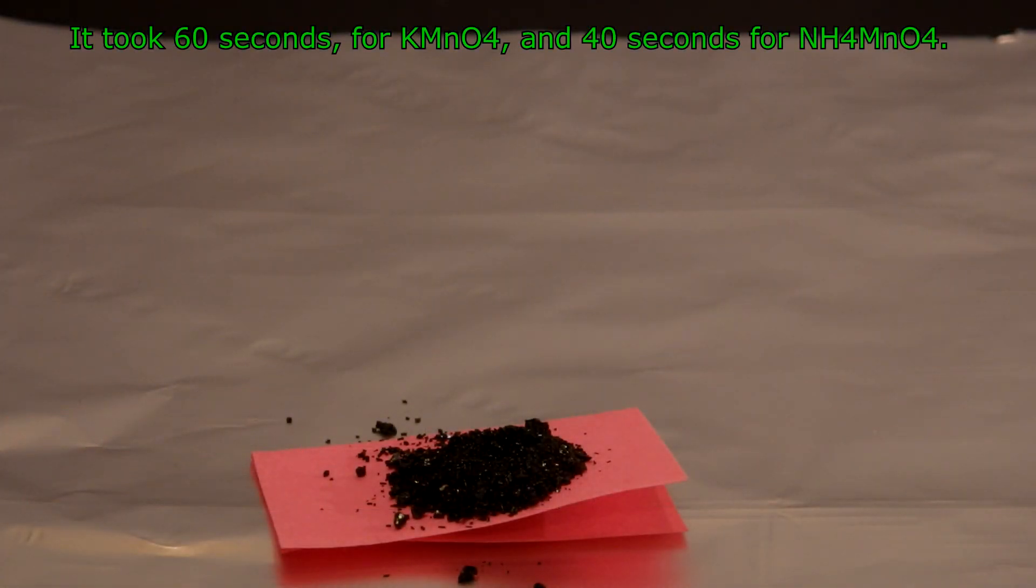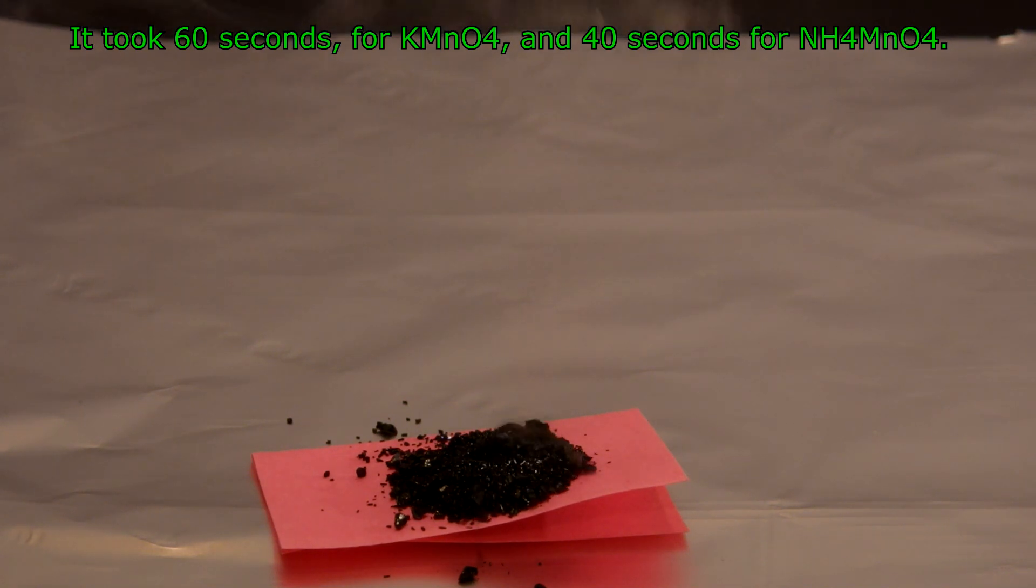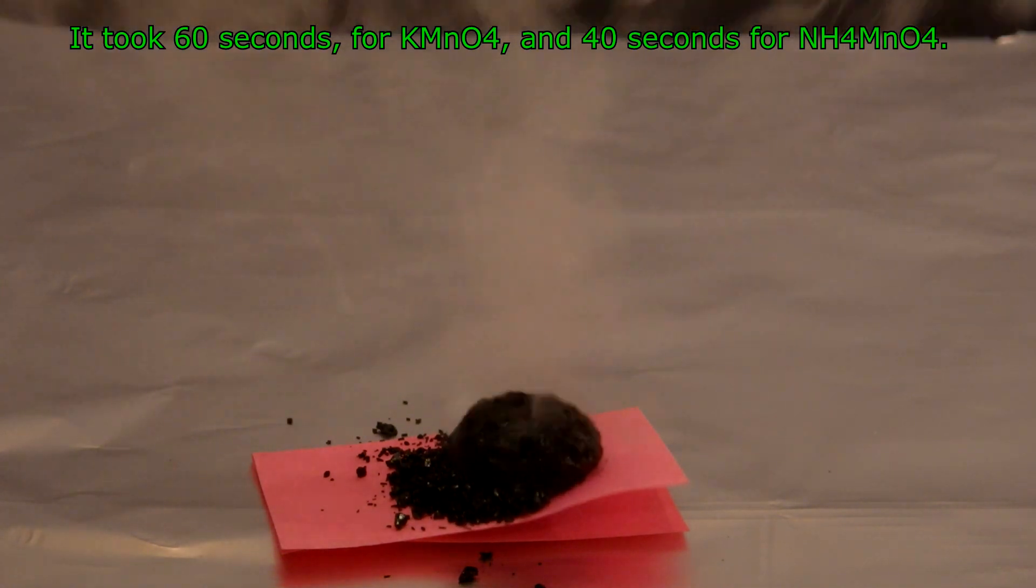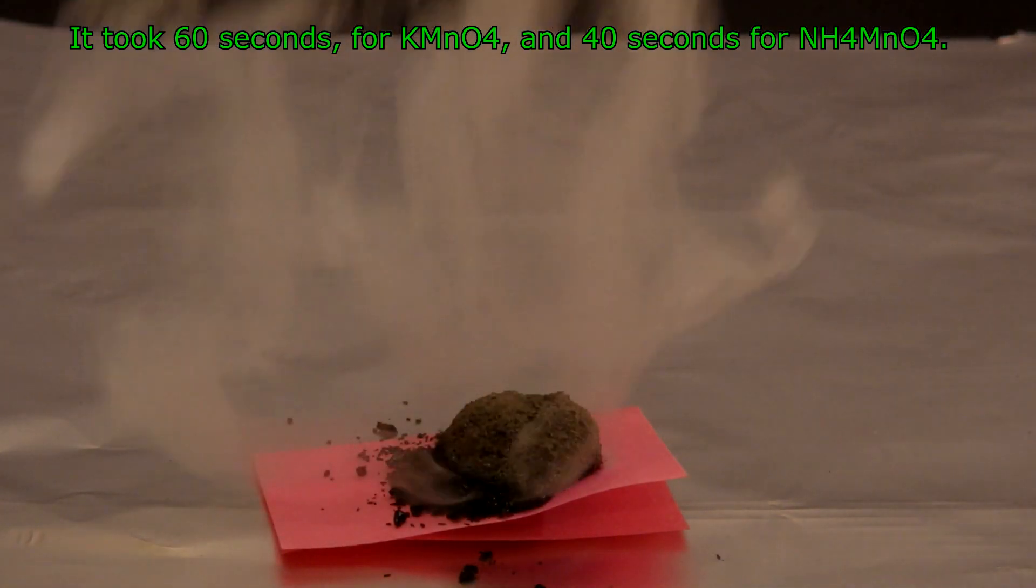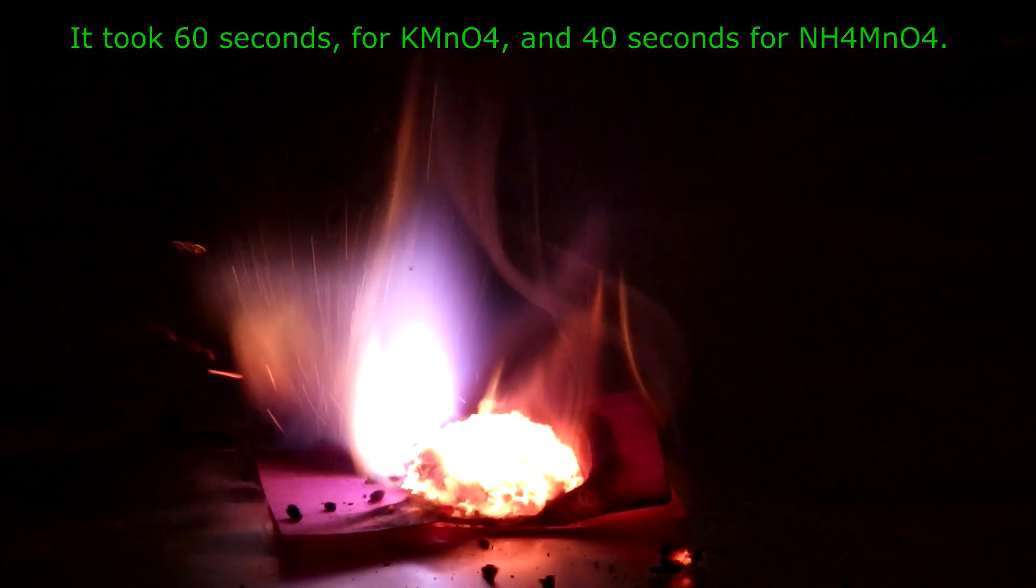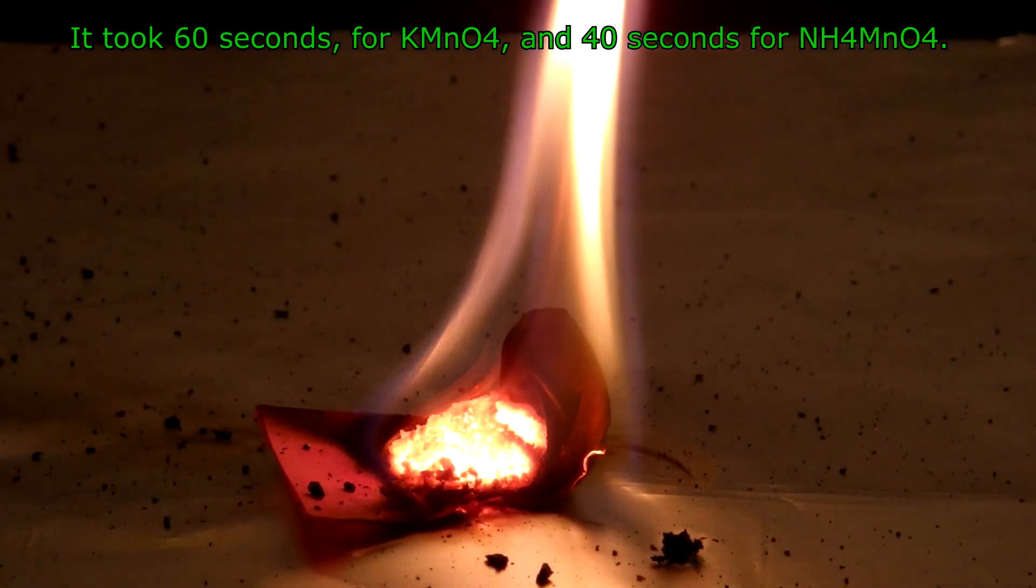Different, isn't it? Not only the reaction is different, but also the speed of oxidation. Although crystal size of ammonium permanganate in this test is bigger, reaction proceeds 20 seconds faster. This means that ammonium permanganate is quite stronger oxidizing agent than potassium permanganate.